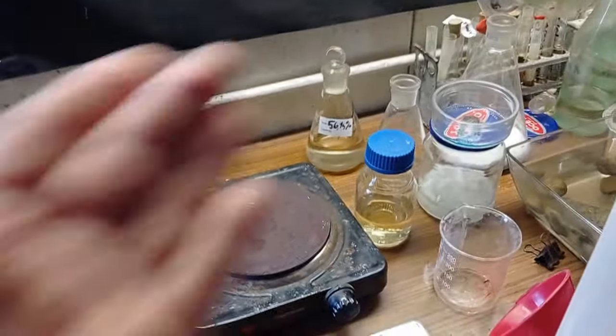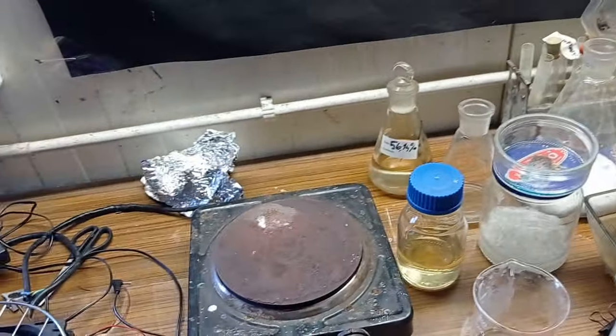Okay, so I'm actually really stupid. It's not like you can't get nitric acid over 68%, you just can't distill higher concentration because 68% is azeotropic. So it's perfectly fine and acceptable to have 72.5% nitric acid. Definitely I can safely use this one for nitration.